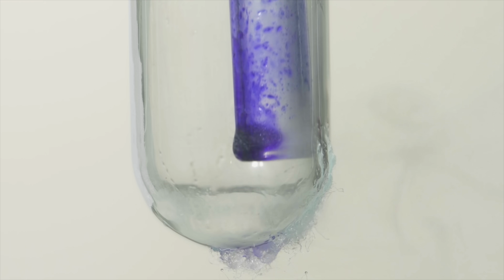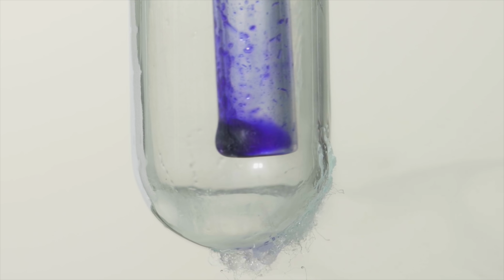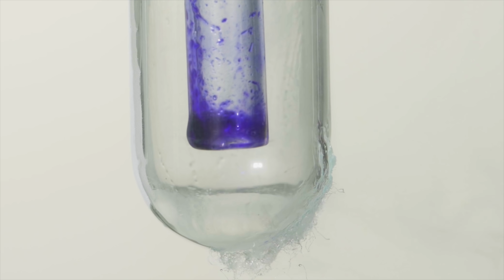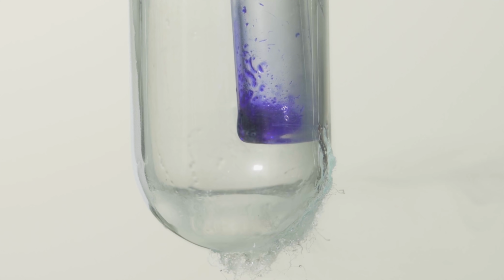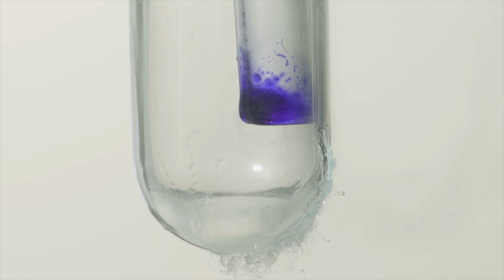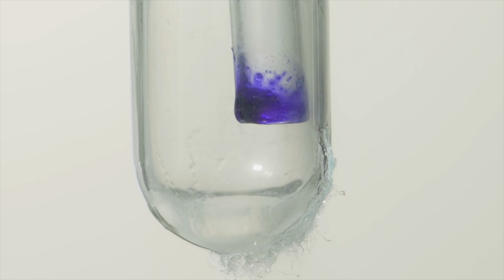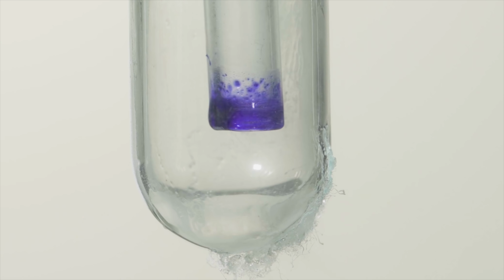Liquid ozone has an exceptional ability to decompose spontaneously. It took me a lot of time to capture a few drops of liquid ozone for this video. So, to demonstrate an explosive self-decomposition of liquid ozone, I will hit the tip of the ozone-resistant silicon tube where liquid ozone drops gather.